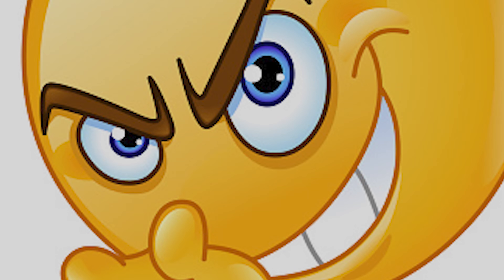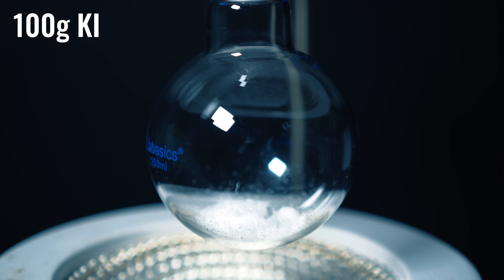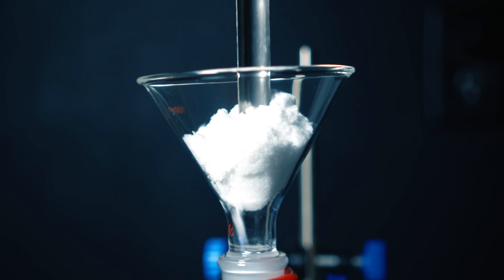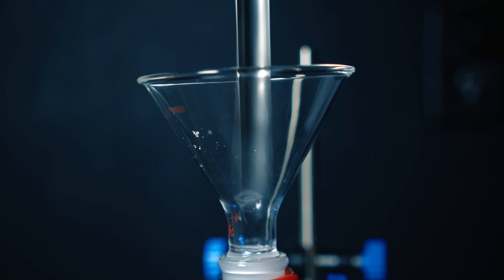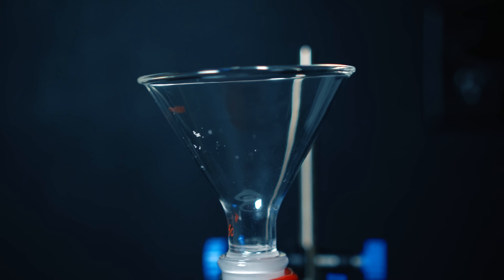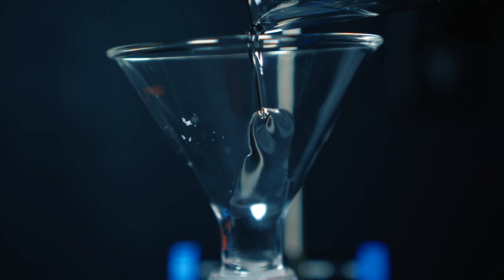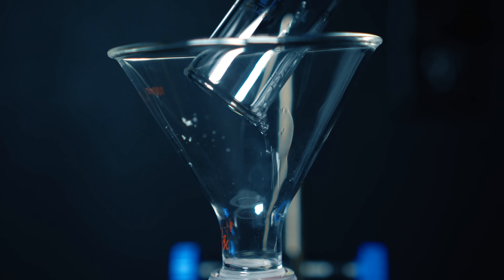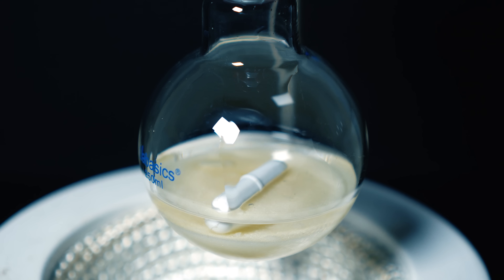Alright, let's go make that hydroiodic acid. To a 250ml round-bottom boiling flask, I added 100g of potassium iodide. Naturally it got stuck in the funnel, and I had to use a metal scoop to push it all the way down. I don't know why, but it really reminds me of something. To this, I added 60ml of 75% phosphoric acid. My phosphoric acid I'm going to assume is a little bit less than 75%, as I've had it for a while and it's likely absorbed some water. I also included a stir bar, though it's really not going to do anything.